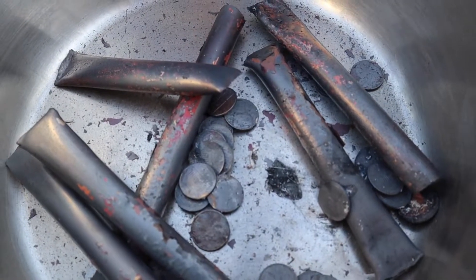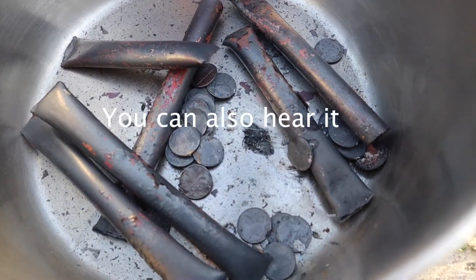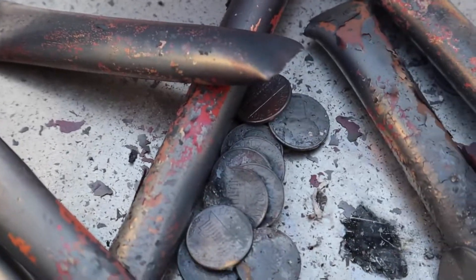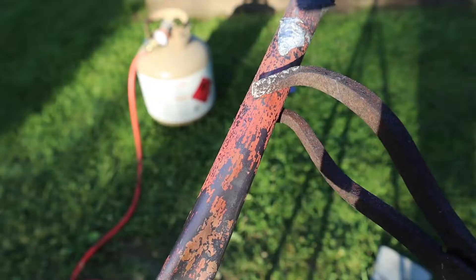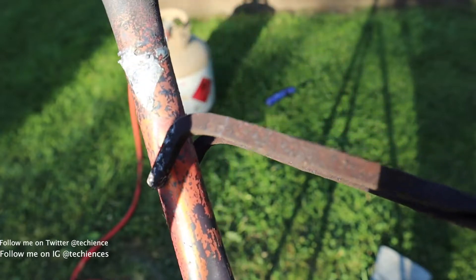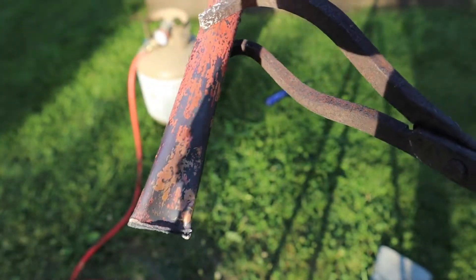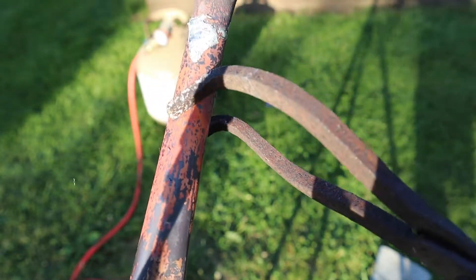If you look closely you can see little pieces of copper 2 oxide flaking off of the metal. All these little flakes are copper 2 oxide. Here is one of the copper pipes — you can see it has a bunch of red all over it. I think that might be copper 1 oxide. I don't think it matters that much whether or not it's copper 2 or copper 1, but I'm trying to make only copper 2.